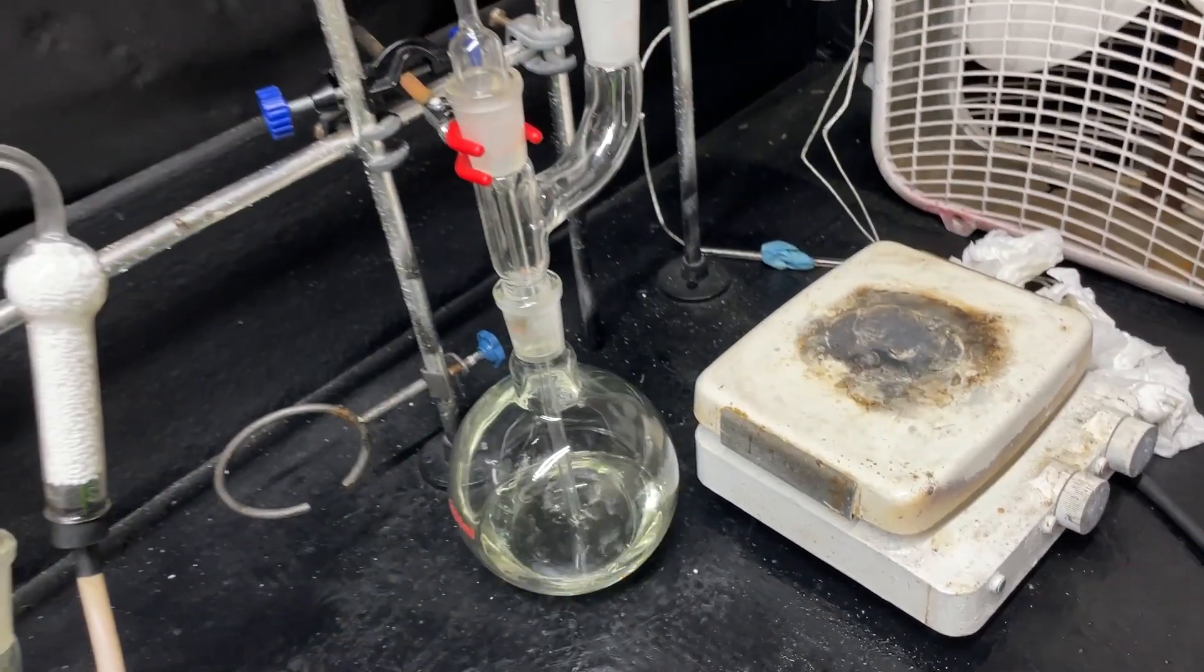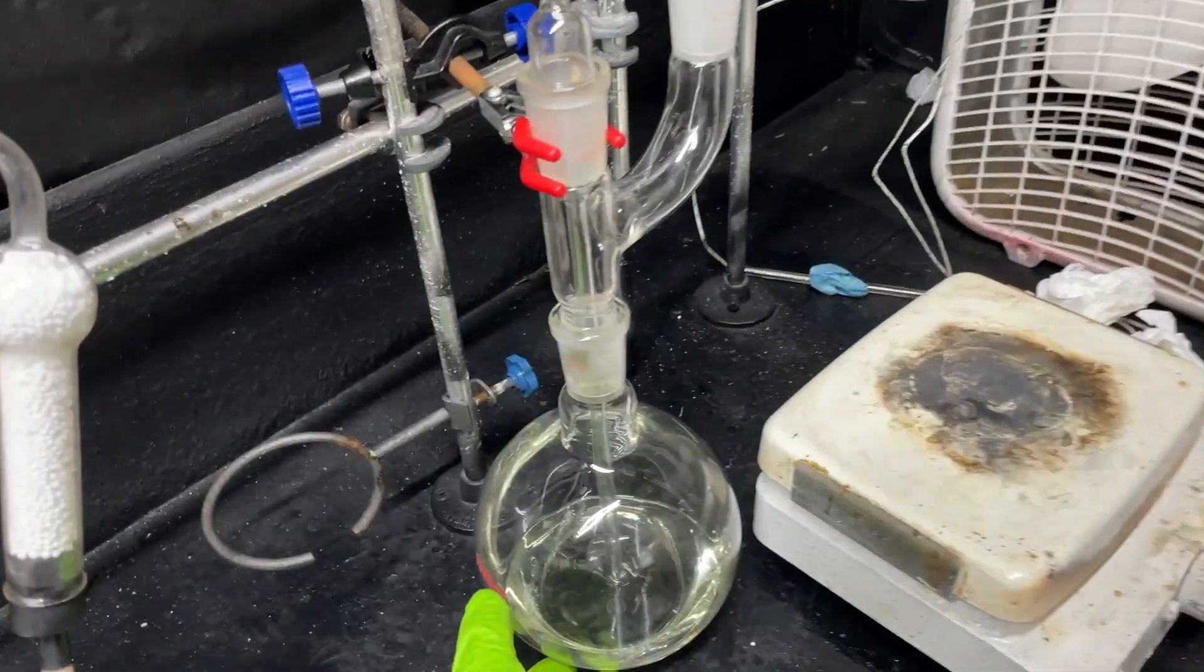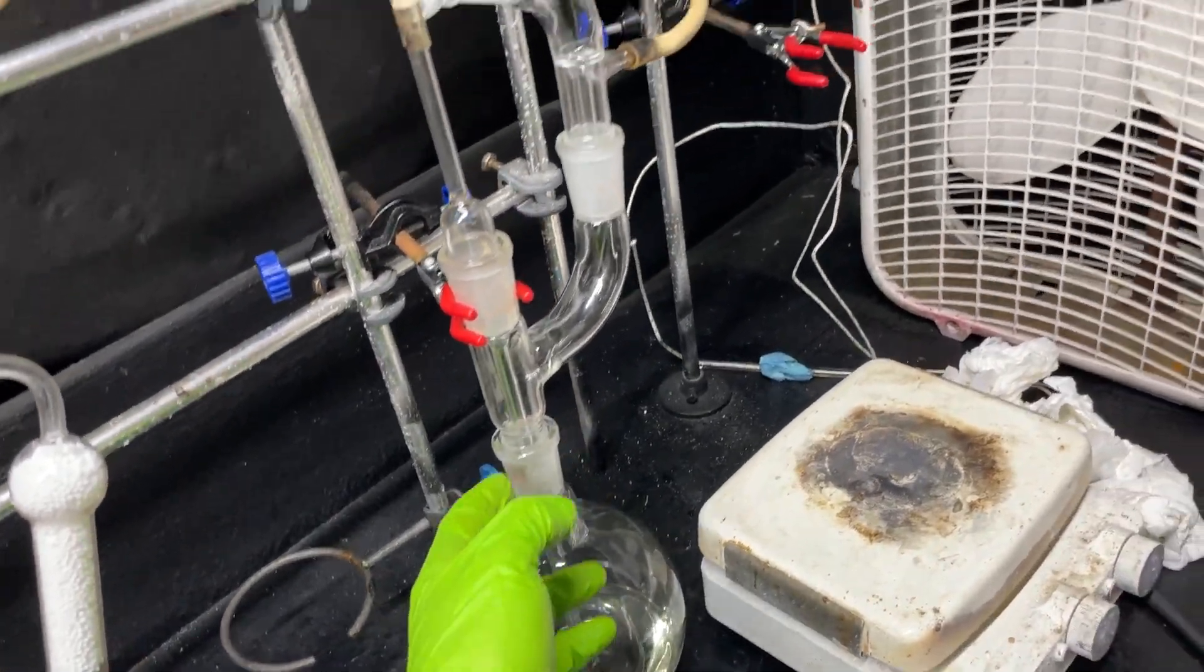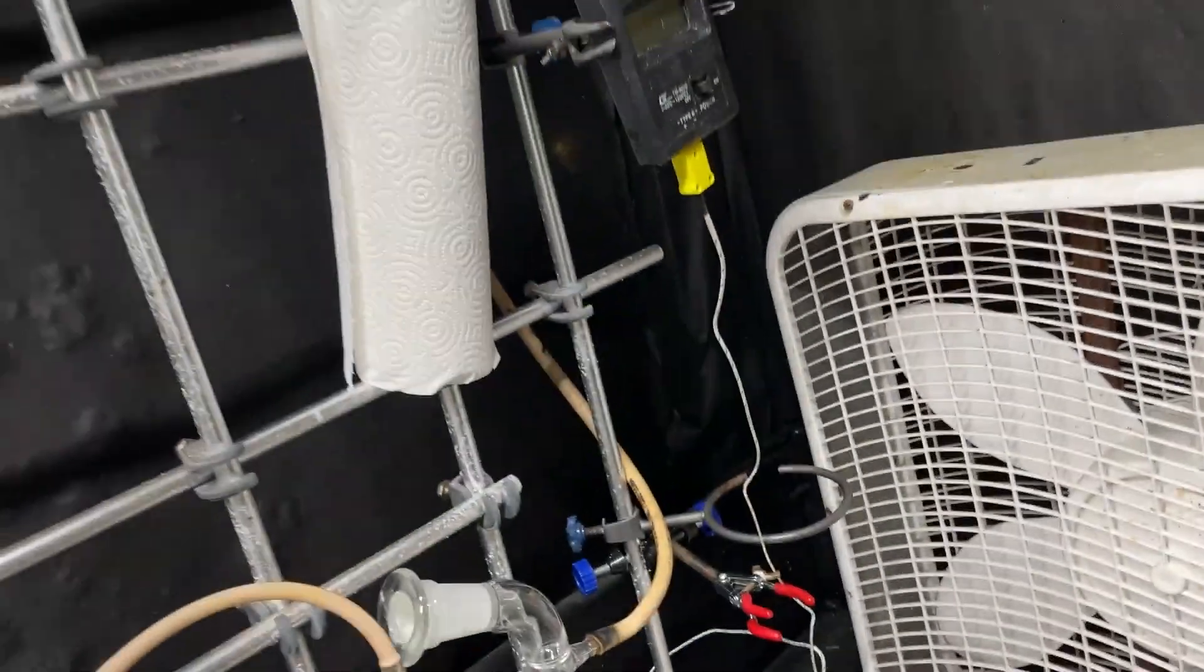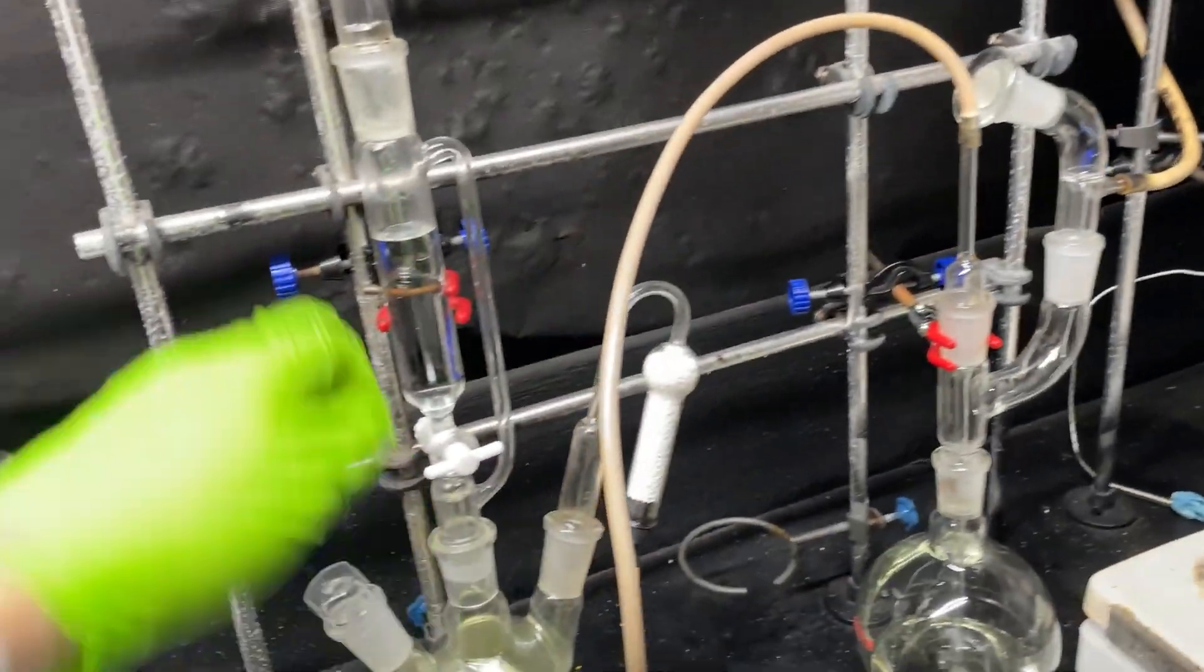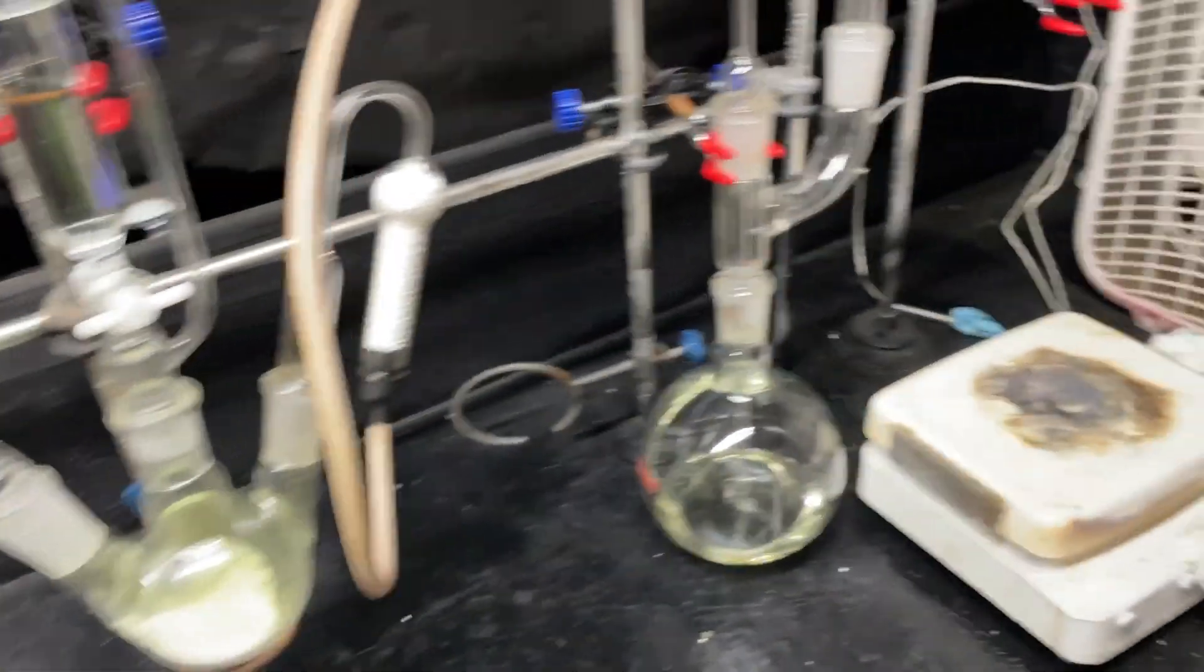And then this will also produce hydrochloric acid - well HCl not hydrochloric acid because technically it's not an aqueous solution. That will flow up and out this tube here and that will flow outside to get rid of the HCl. Let's go ahead and run it.